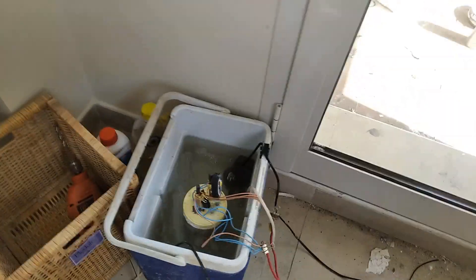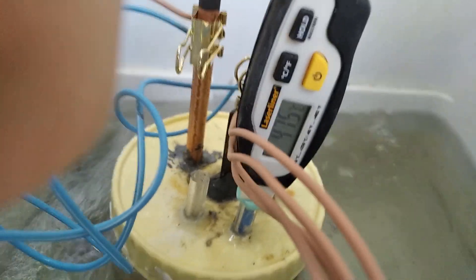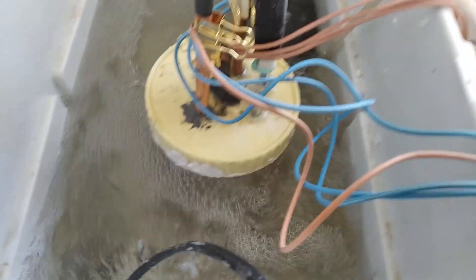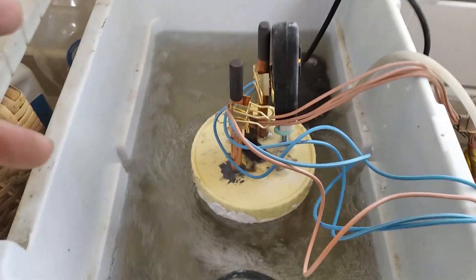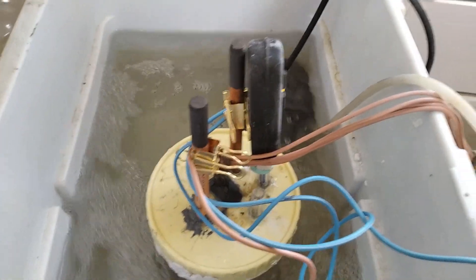This is our new 32 amp perchlorate cell. Temperature is now 47.4. It makes use of two pumps for active cooling. The reason why there's air is to increase heat transfer by creating turbulence at the surface — it seems very futile, but that's all I've got for now. That other pump has a Venturi which allows the introduction of the air.